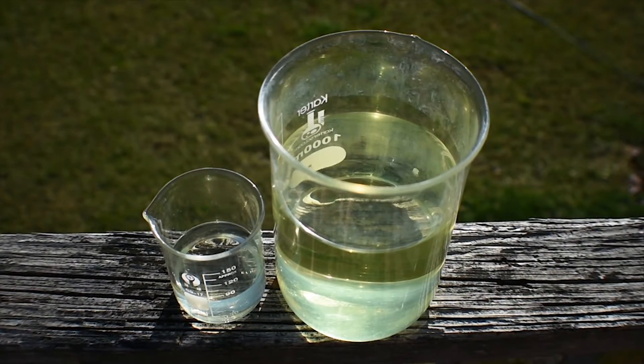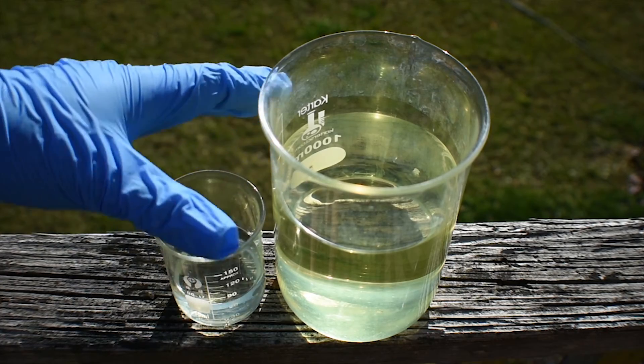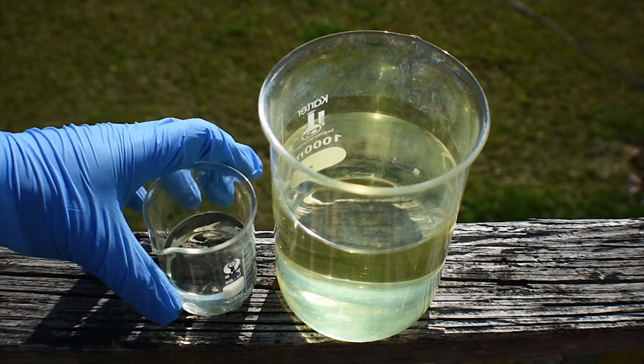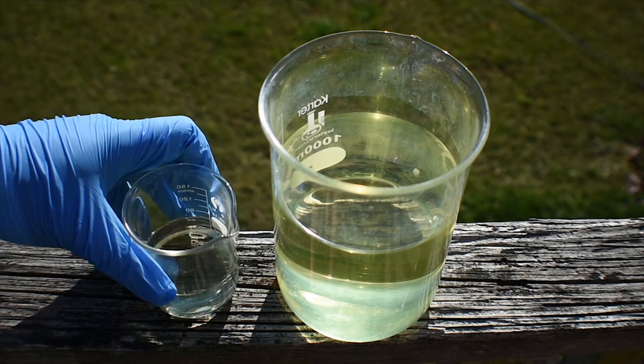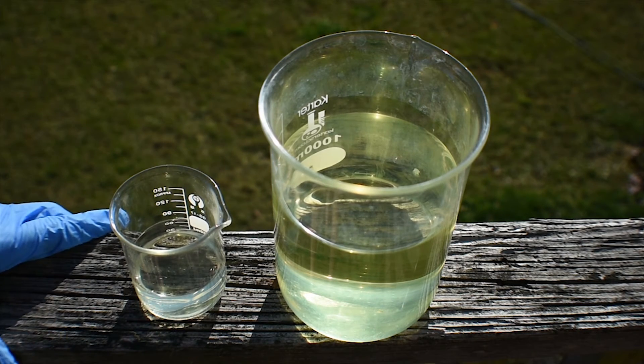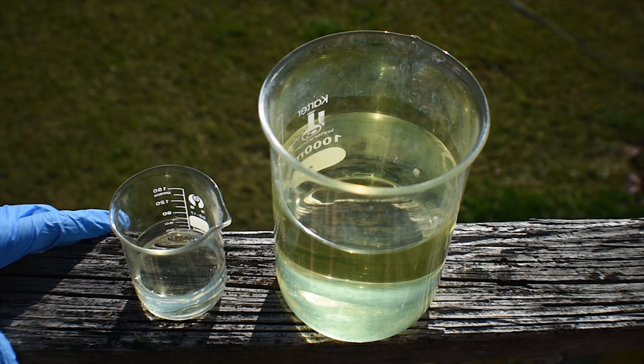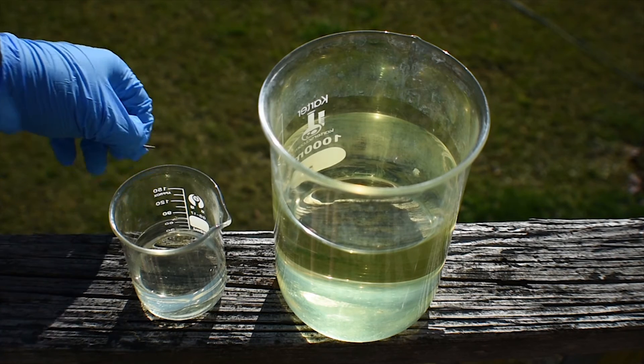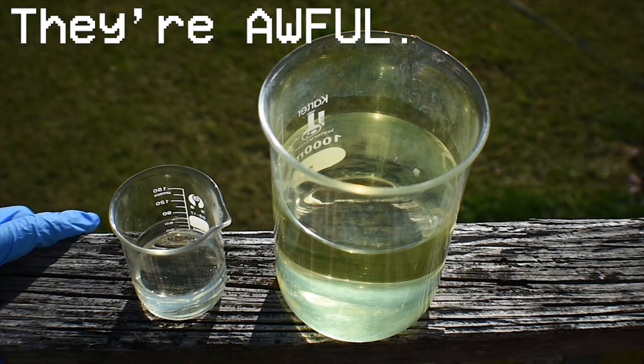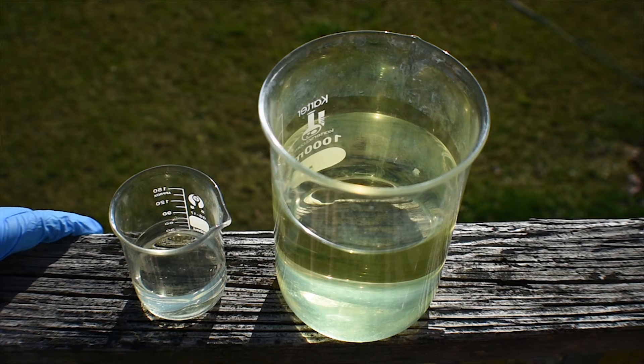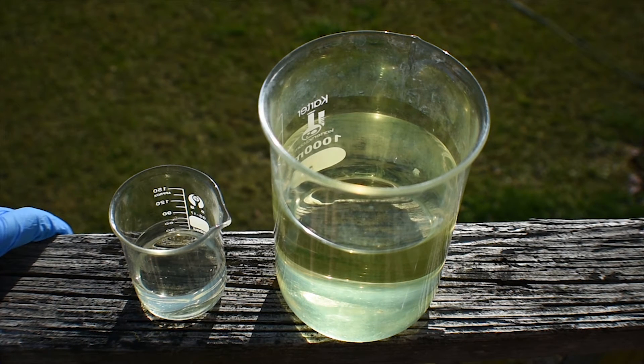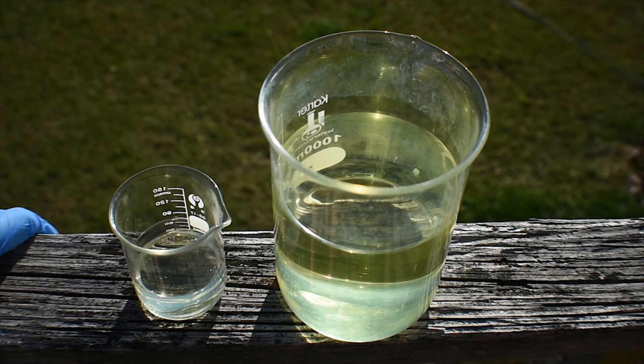Okay, now that we're outside or in a very well ventilated area, we can continue. So, what we got here is 800 milliliters of a 6% sodium hypochlorite solution. And to that we're going to add our acidic solution of ethylene diamine acetate. This will form the tetrachloroethylene diamine, which will sort of oil out a solution at the bottom as a very bright yellow oil. And trust me, if you've never smelled a chloramine itself or a substituted chloramine, you're in for a treat. It's one of probably the worst smelling categories of compounds I've ever made or even come in contact to. It's just disgusting.